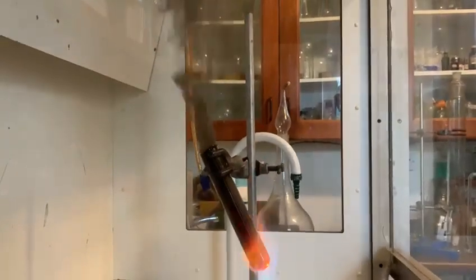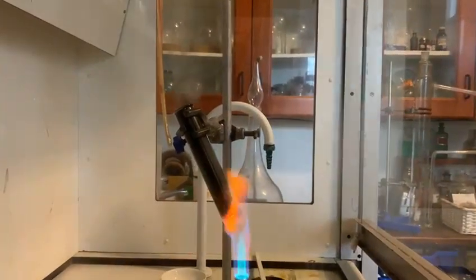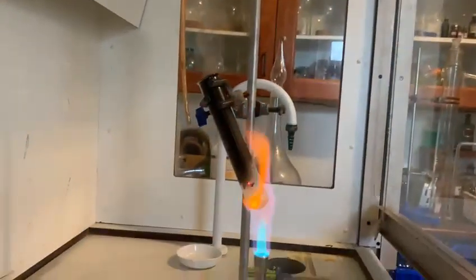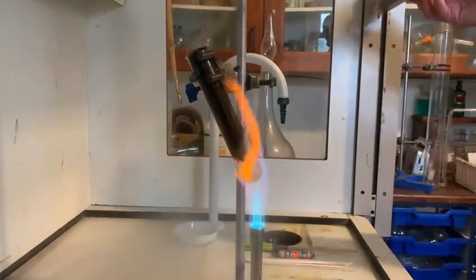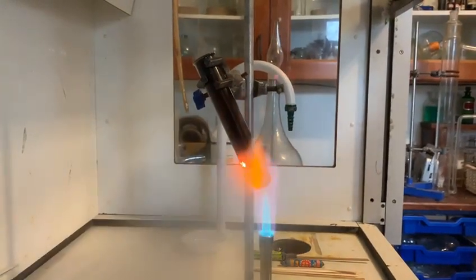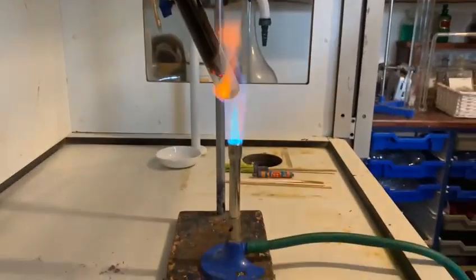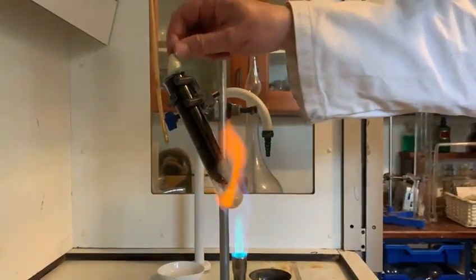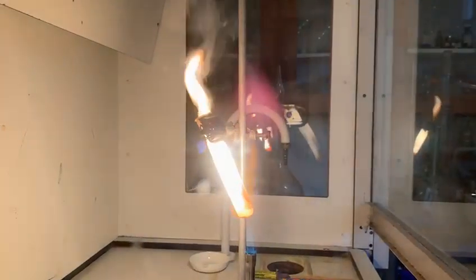You get a very exothermic reaction. Then we're going to add, just for a bit of fun, a piece of sulfur — just a rock piece of sulfur like this. Let's see what happens. There we go — really, really bright flame. It's amazing. It's as bright as phosphorus now, isn't it?